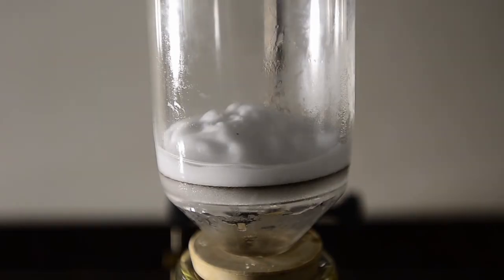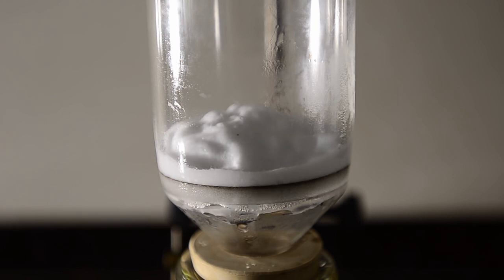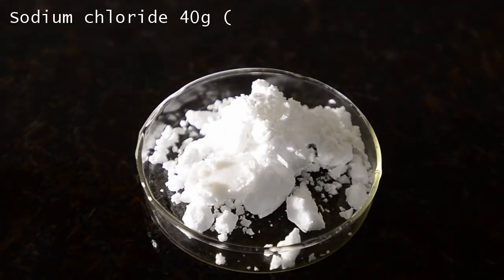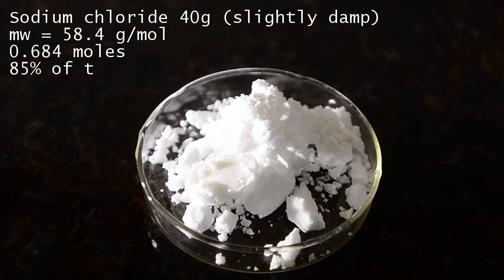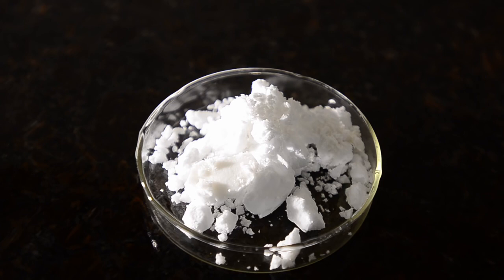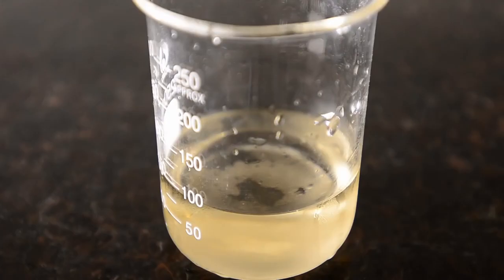We allowed all the liquid to filter through and for the salt to become reasonably dry. We ended up recovering 40 grams of sodium chloride. As you can see here it's slightly damp, but even so, according to the stoichiometry of the reaction we would expect 47 grams to be produced in total, so this is not bad at all.